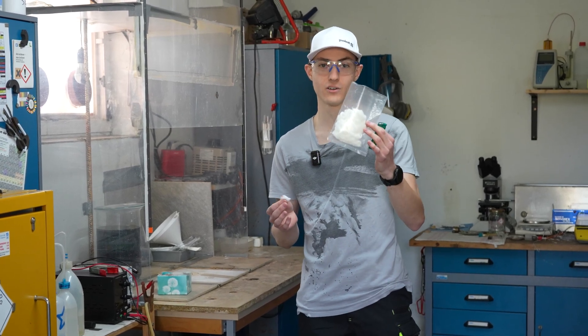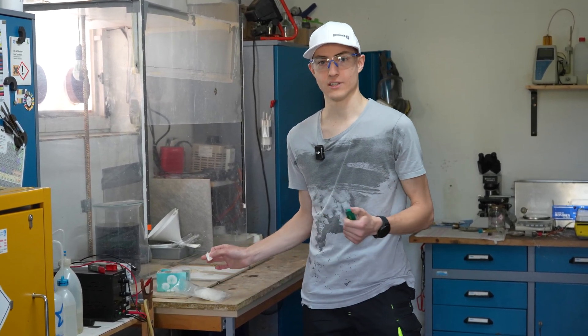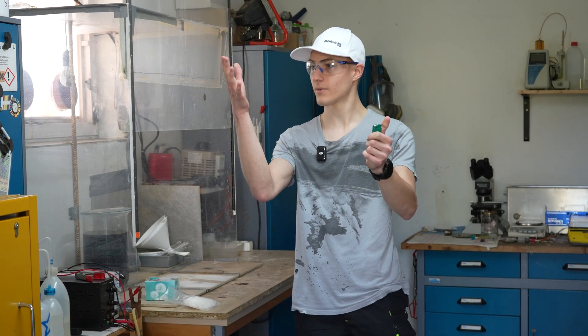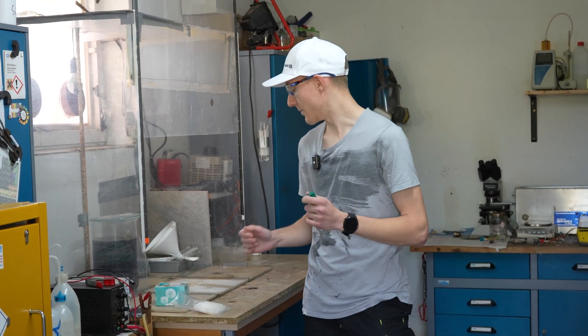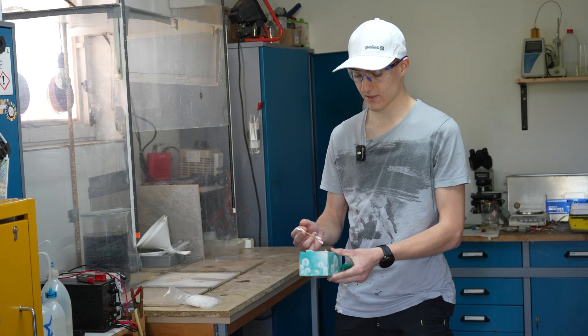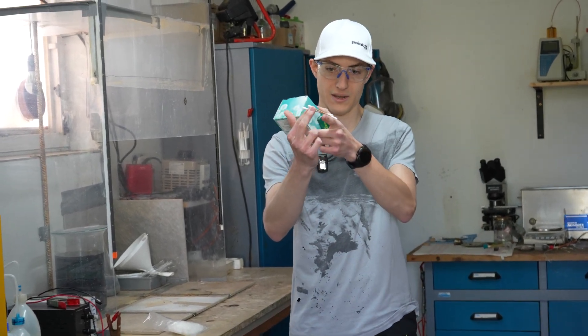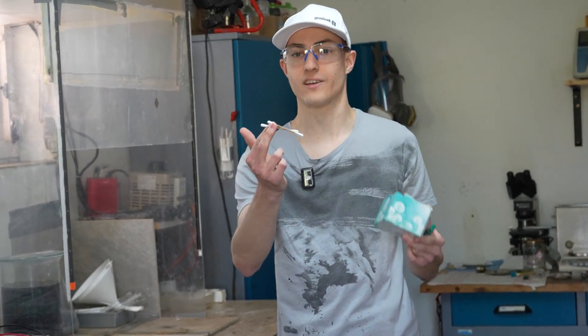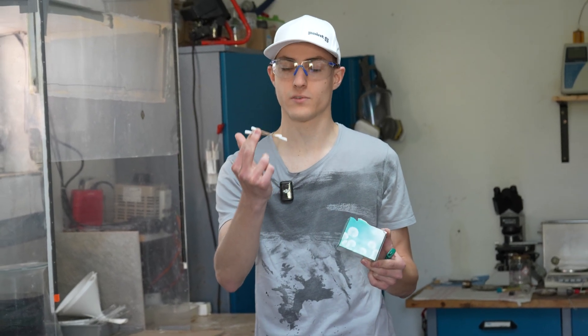Recently I had to make some gun cotton at work, also called nitrocellulose. So today I thought, since nowadays these cotton ear swabs come with paper in the middle, maybe we could nitrate the whole thing and make some explosive Q-tips.